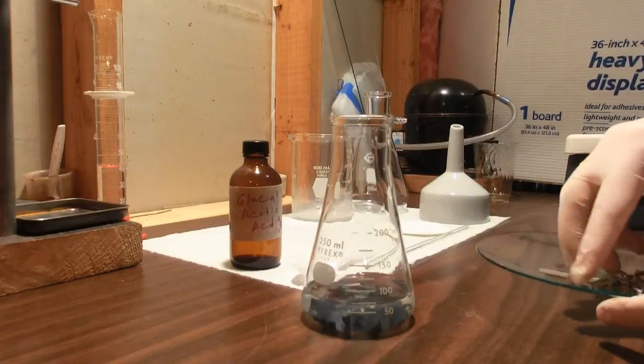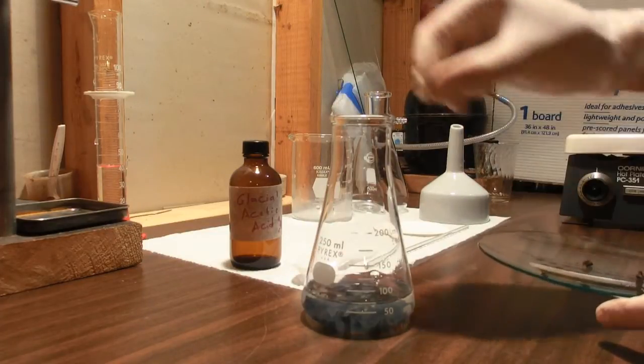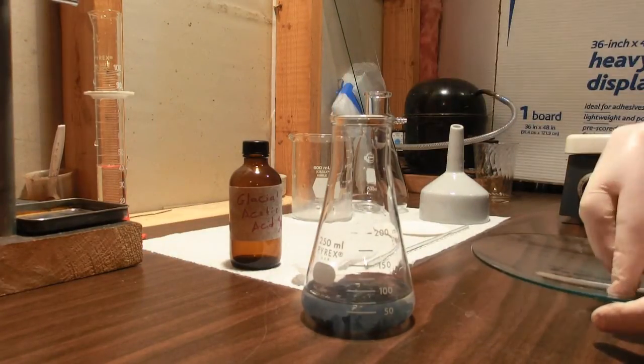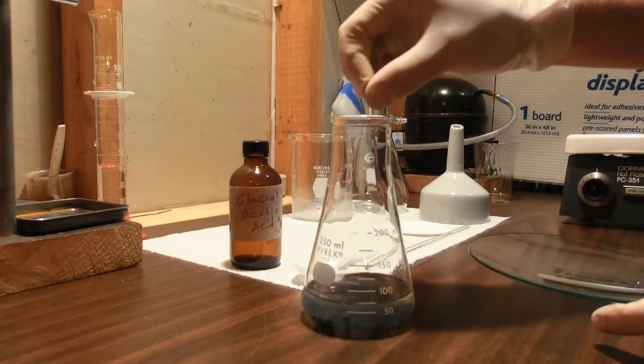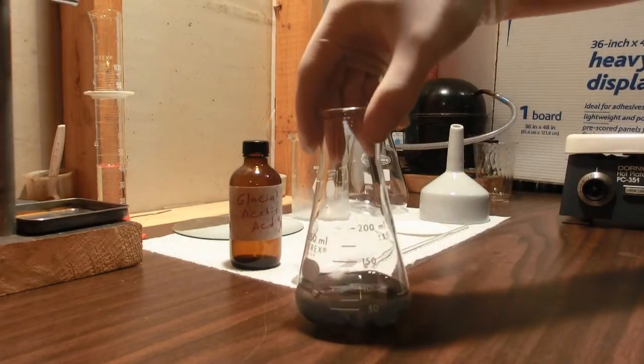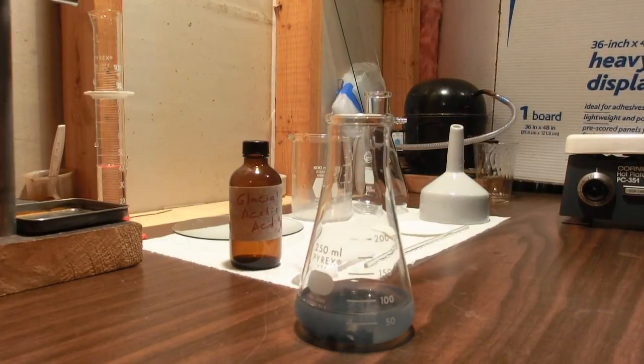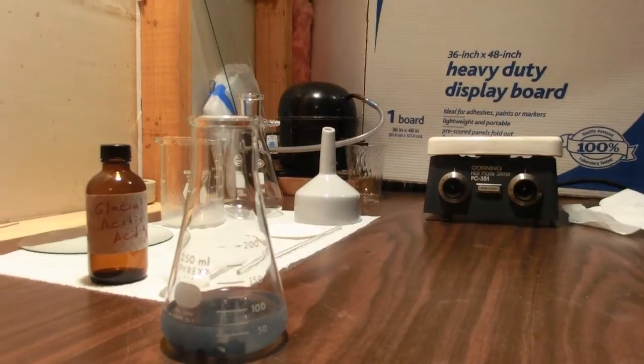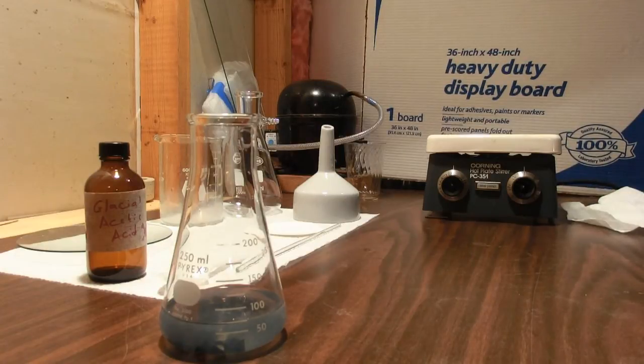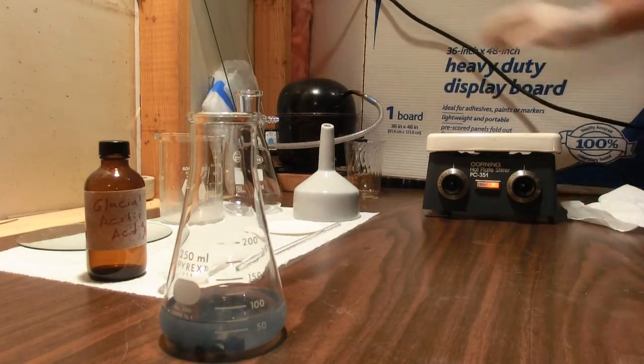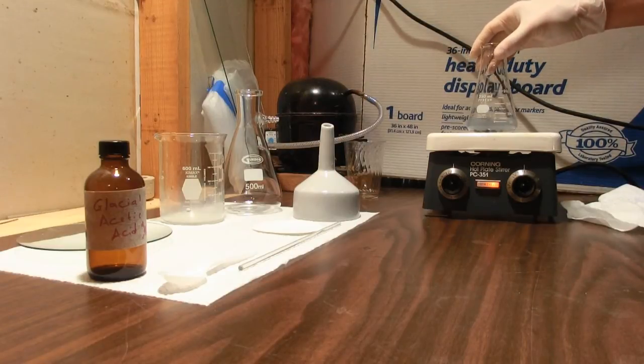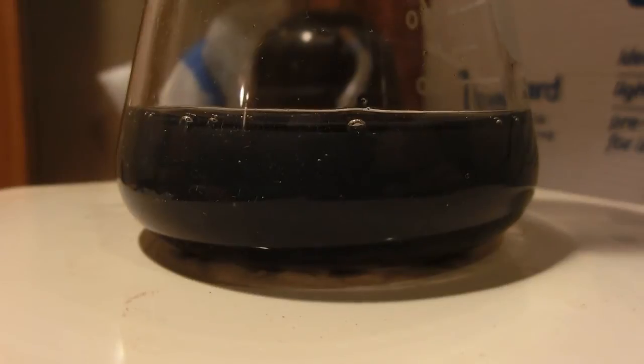I'm going to put this under the lid. And here we go, on the hot plate for gentle heating.